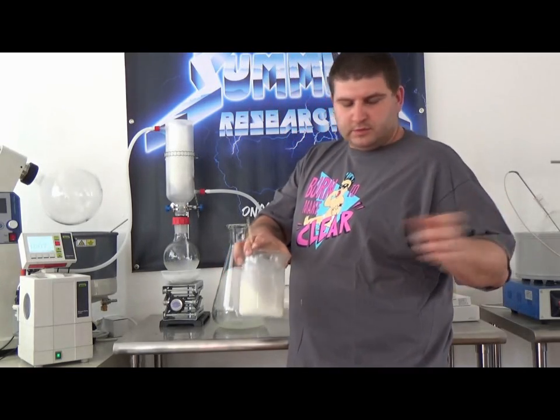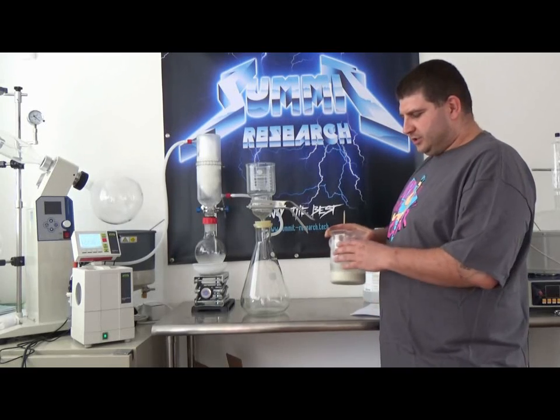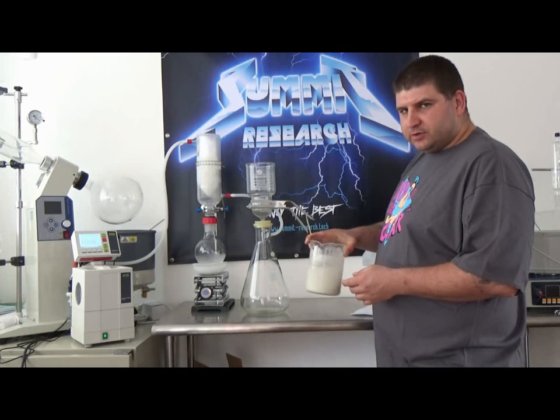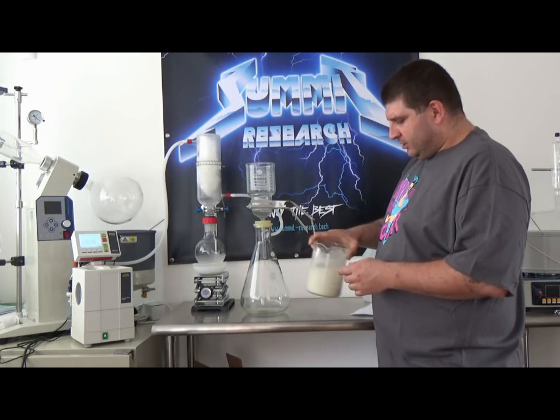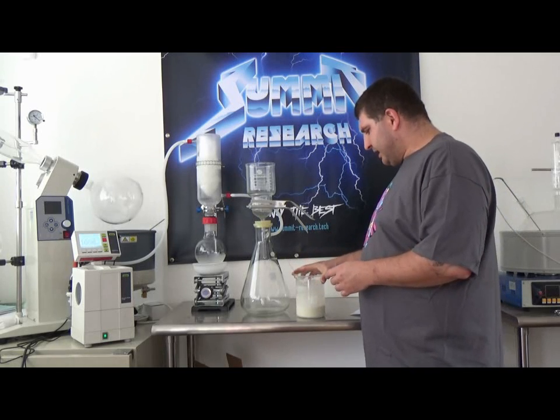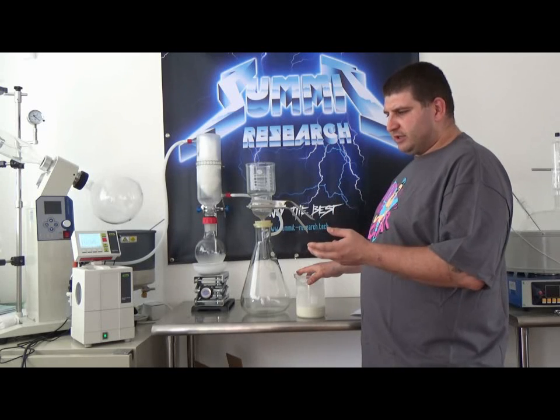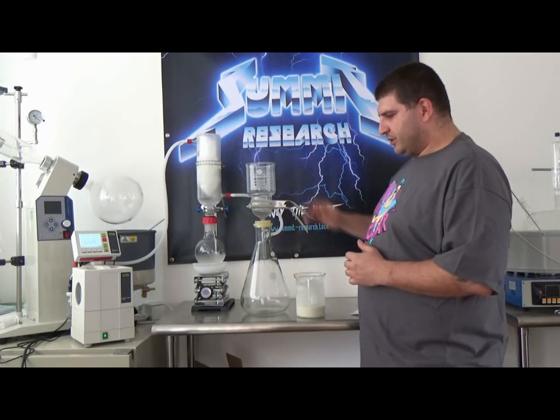We are going to mix it out really well. What we have done is mixed the desired amount of our filter media with alcohol. We tested it and showed you how it flows without any cake on less-than-one-micron glass paper. Now notice we have six or seven different known minerals and components from silica powders — they are engineered for flow, capturing things, and allowing things to settle and auto-level on the filtration paper properly.